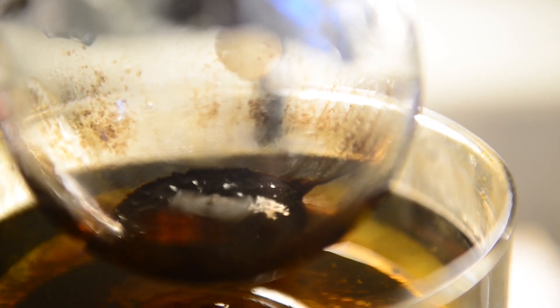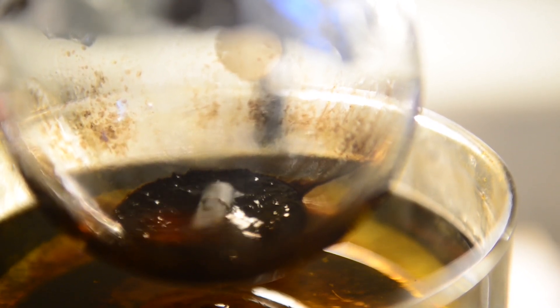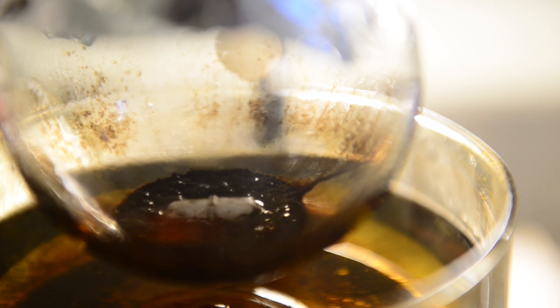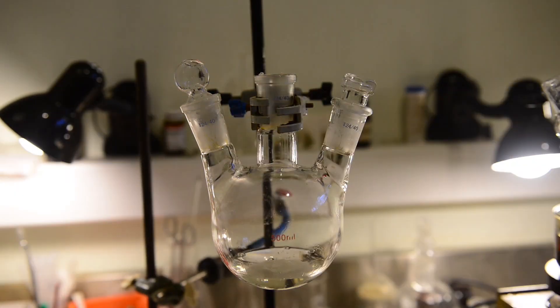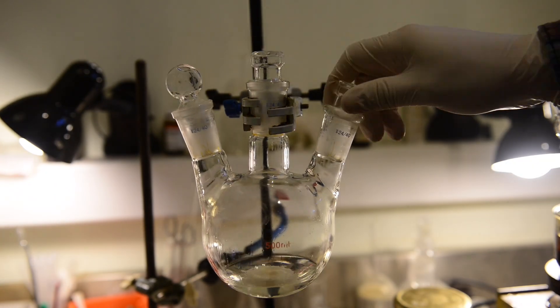Now, we need to dilute the collected product mixture with 30 milliliters of diethyl ether. We add sodium hydroxide to the mixture. According to the instruction, the product must be stored over solid sodium hydroxide for three hours.